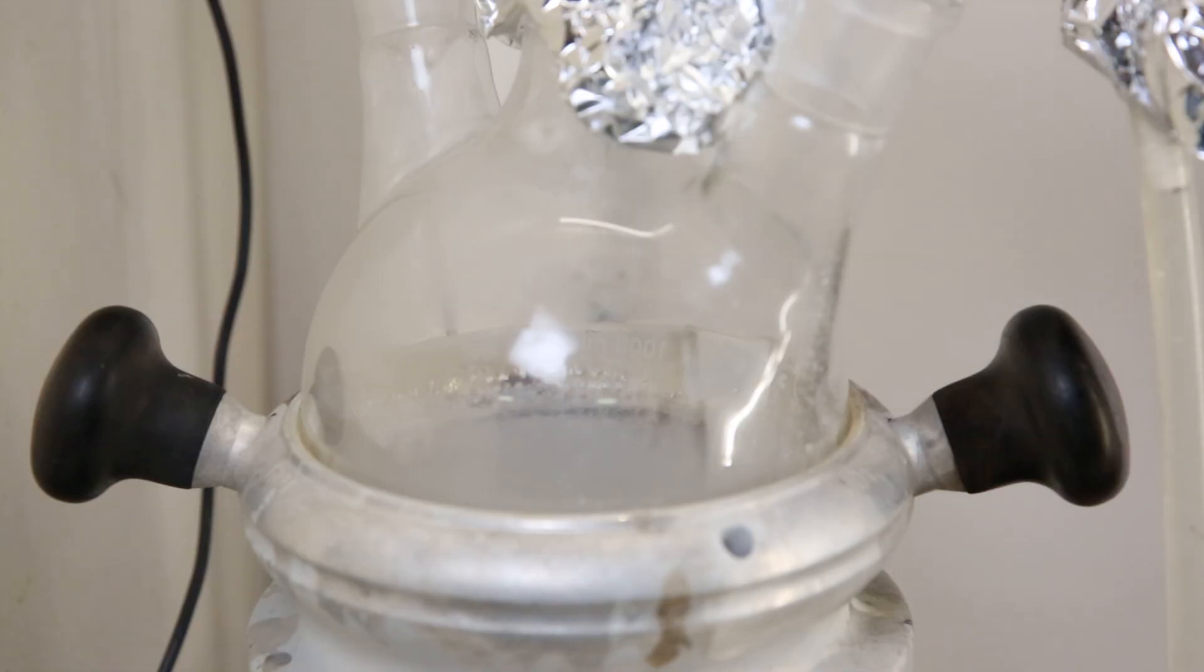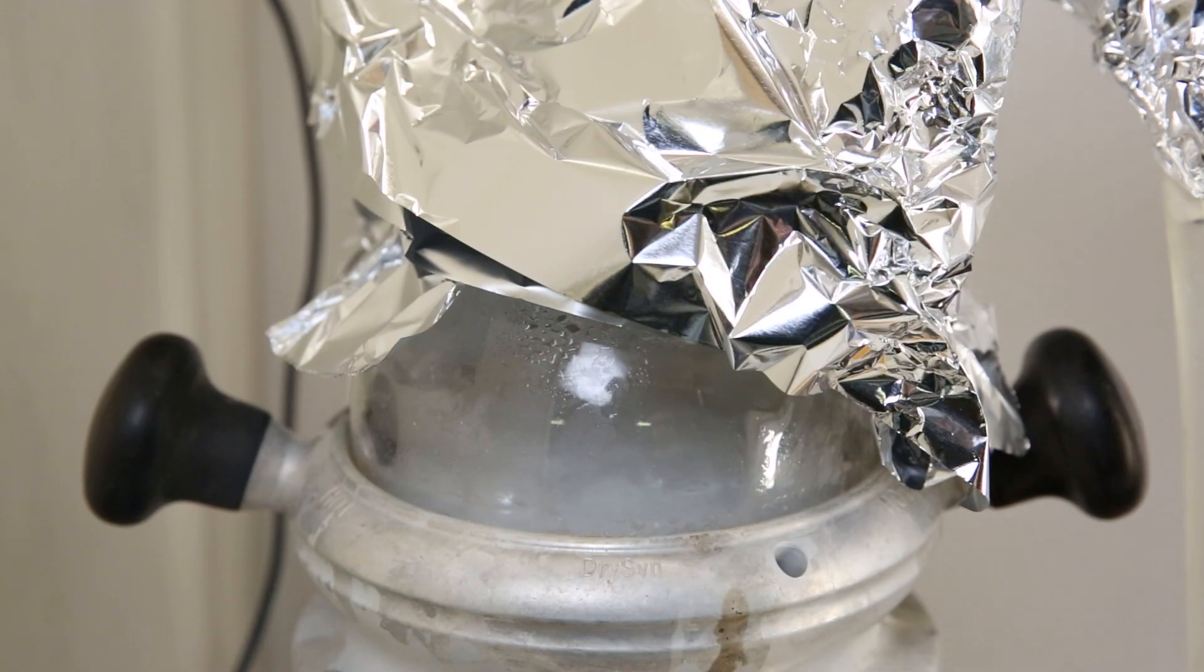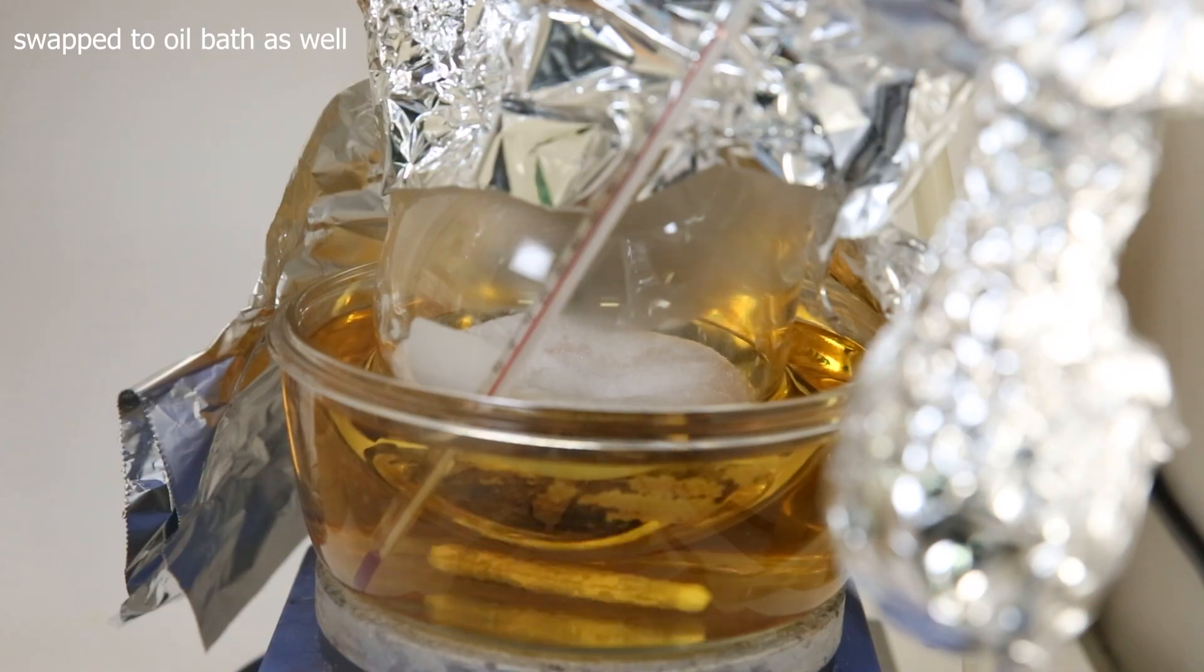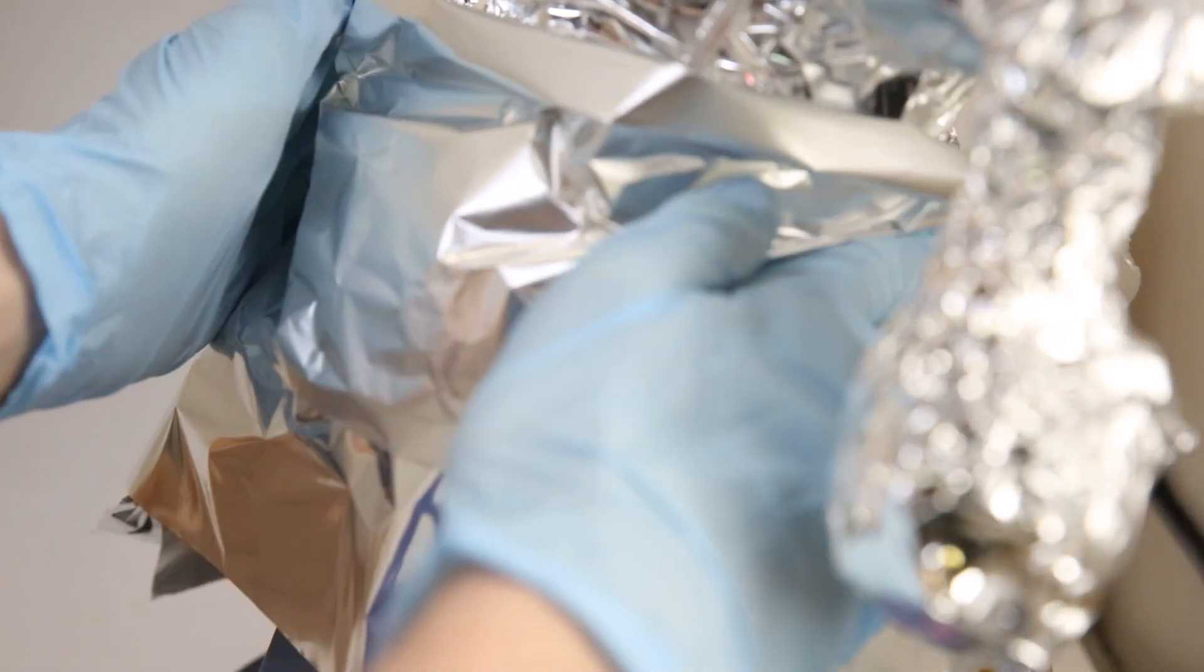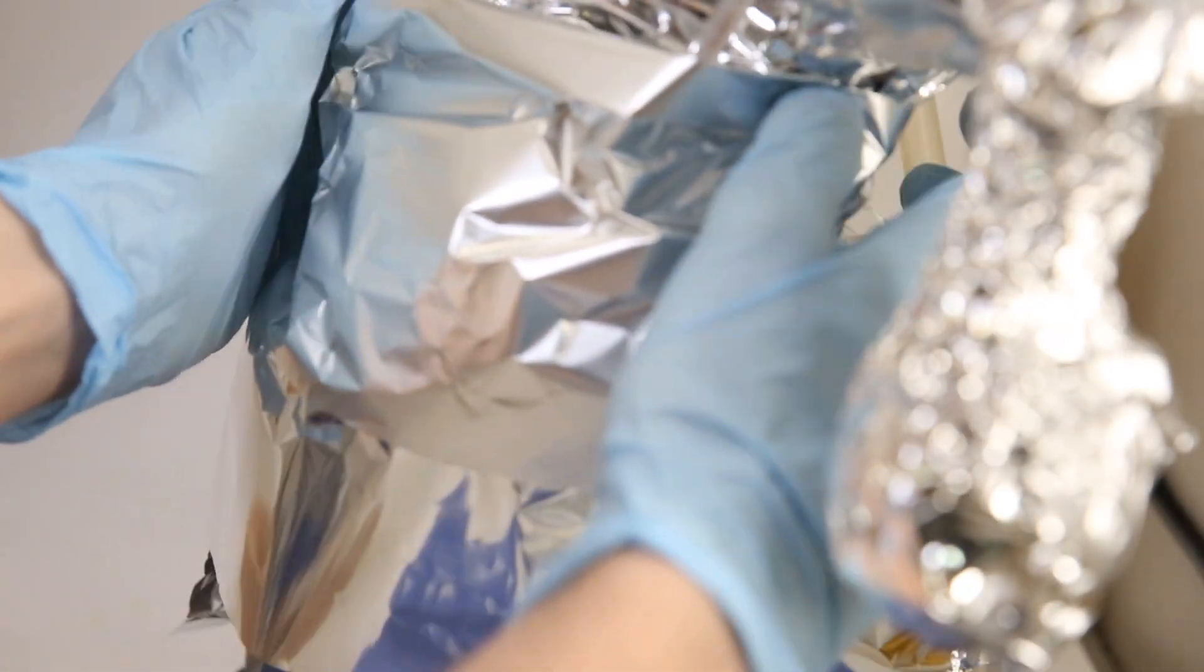Before I cover up everything, I heat it to 250C and make sure something starts to come over. After a while, it starts to boil and the first drops are arriving in the first receiving flask. Now that I know something is coming over, I can cover up the whole apparatus.